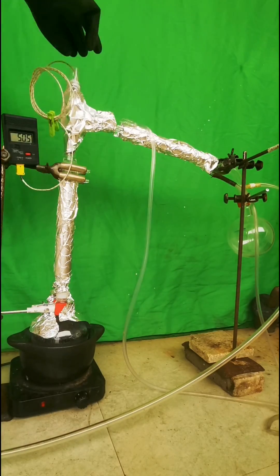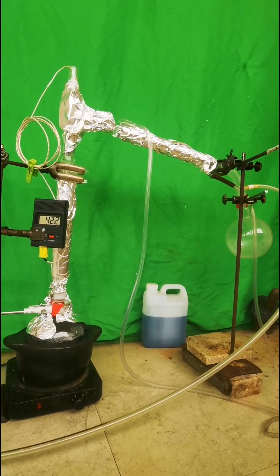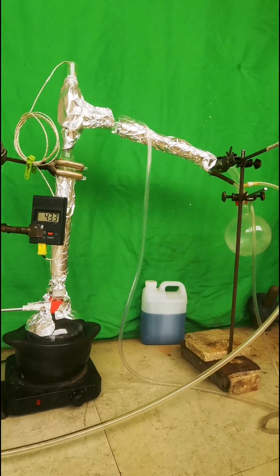Thermometer is also necessary. Then I open my vacuum pump and turn on the heating.